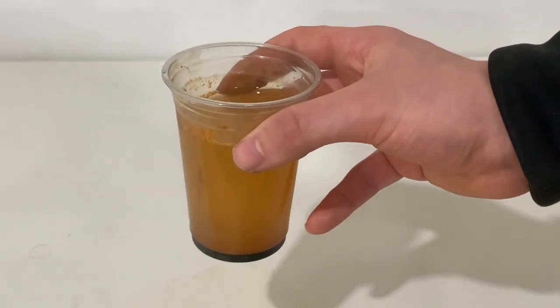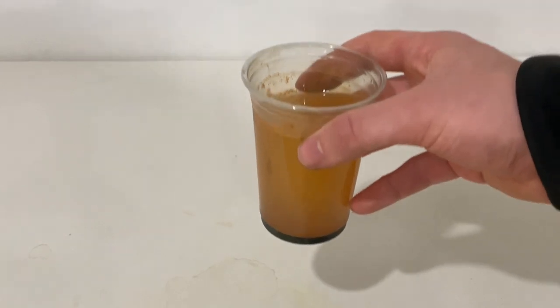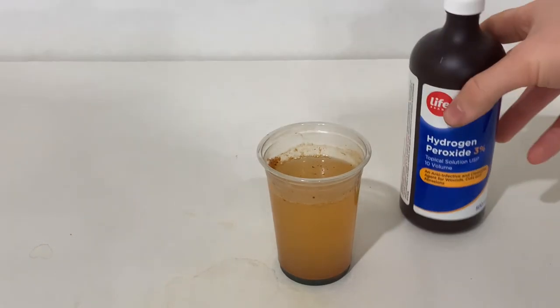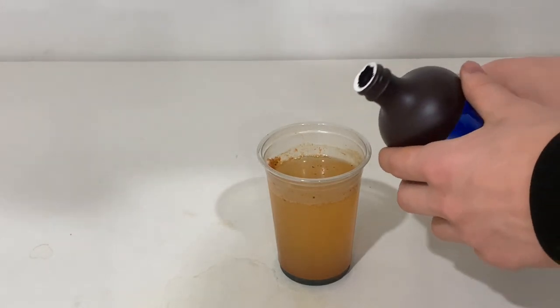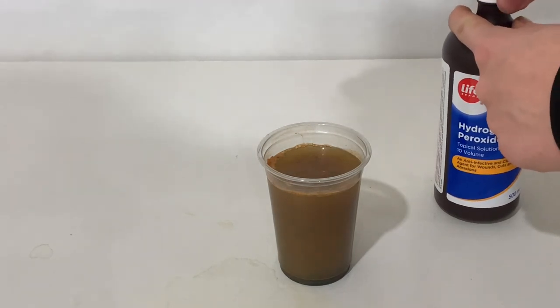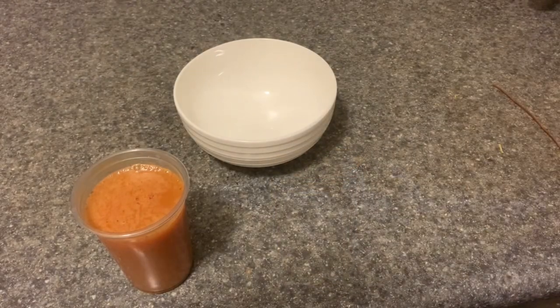We have a solution out of this. We could pour this out on a plate and leave it to oxidize fully for a few days to let all the iron-2-oxide hydroxide become iron-3-oxide. There is, however, another solution: we'll need to use an oxidizer to oxidize everything inside of it. Hydrogen peroxide will work quite well — take a little bit of hydrogen peroxide and pour it inside. This should oxidize all of the green stuff. It's become a very deep shade of brown right now because the current disturbed everything inside of it. I'll need a slightly bigger cup for this.